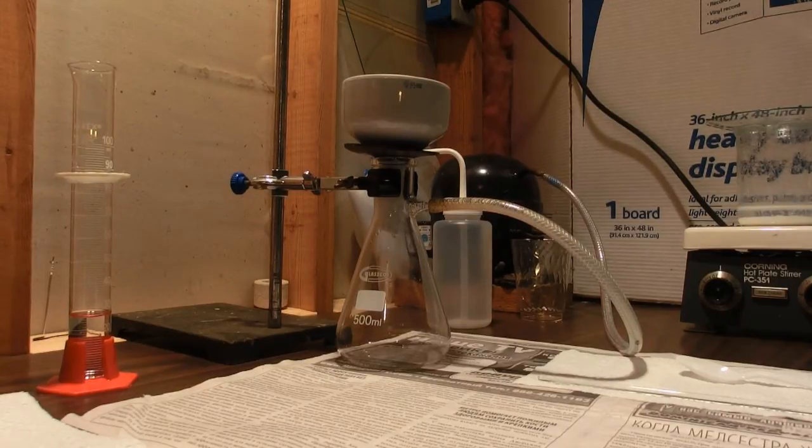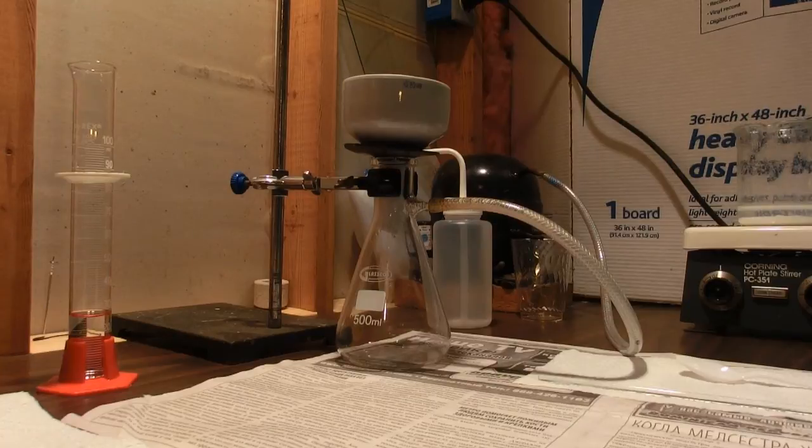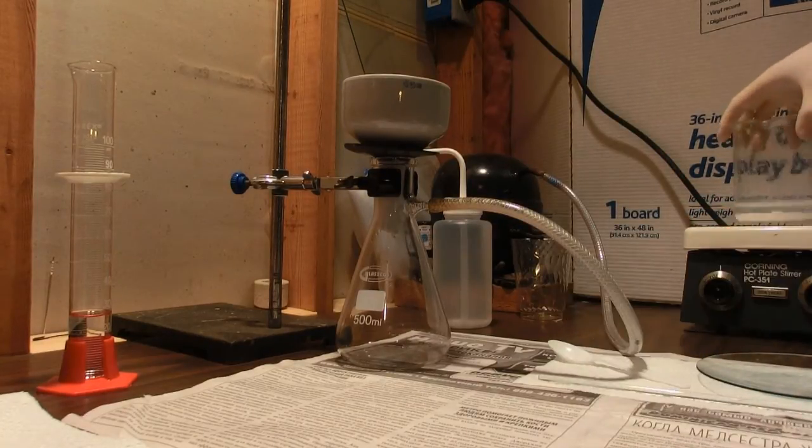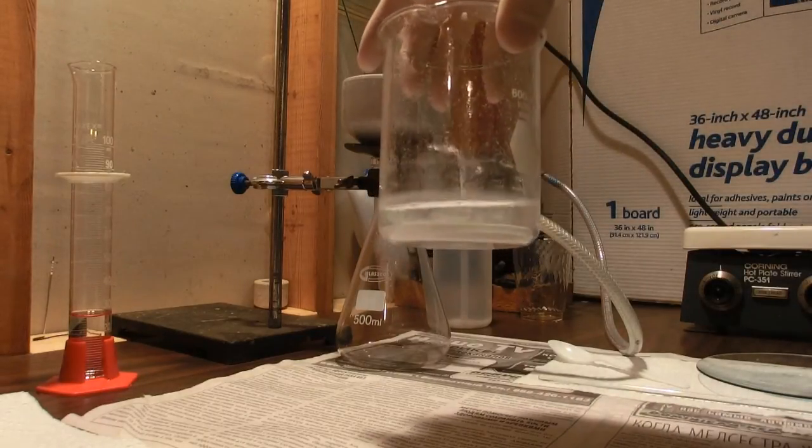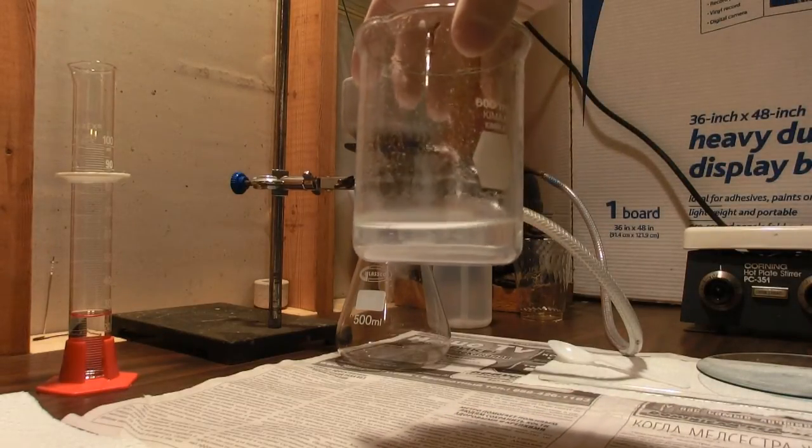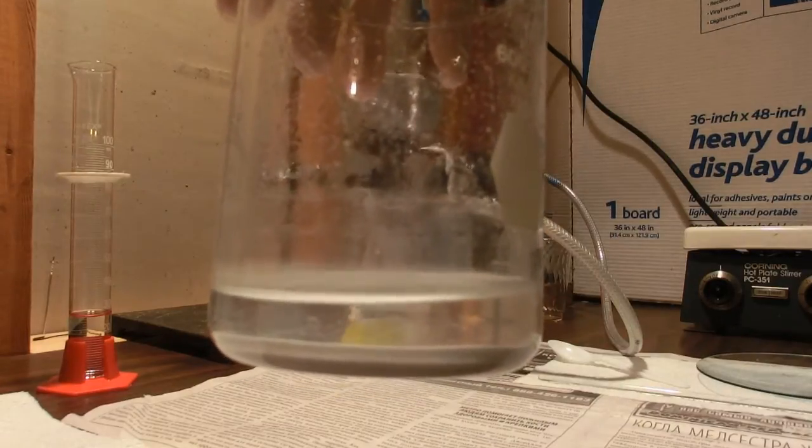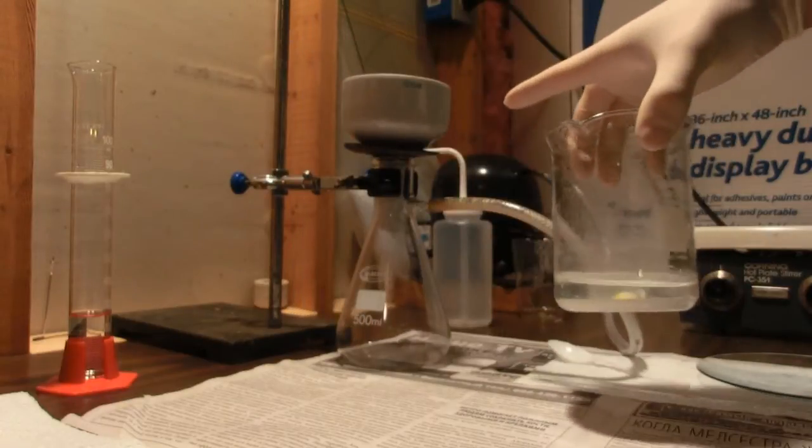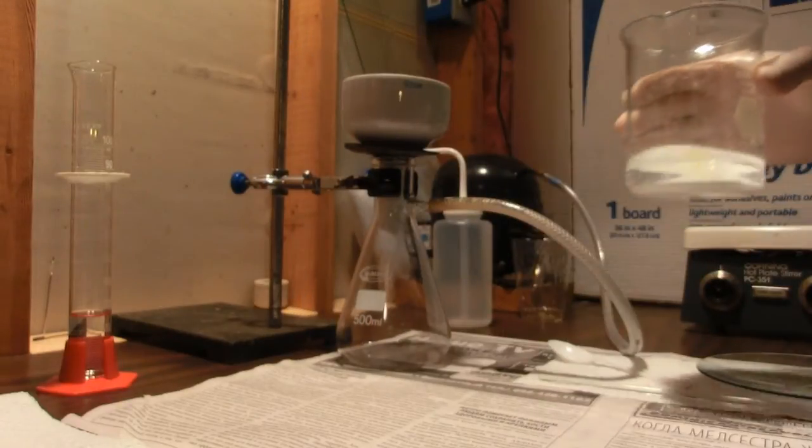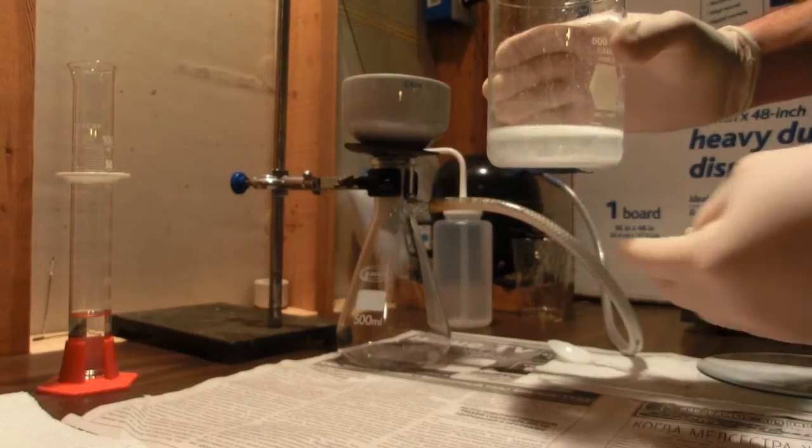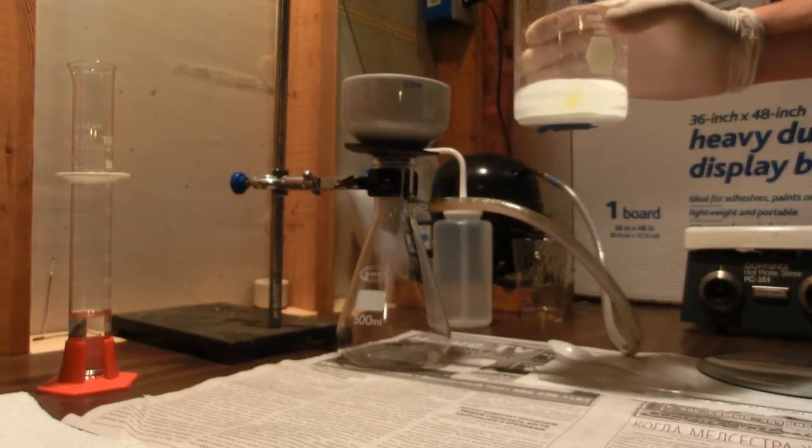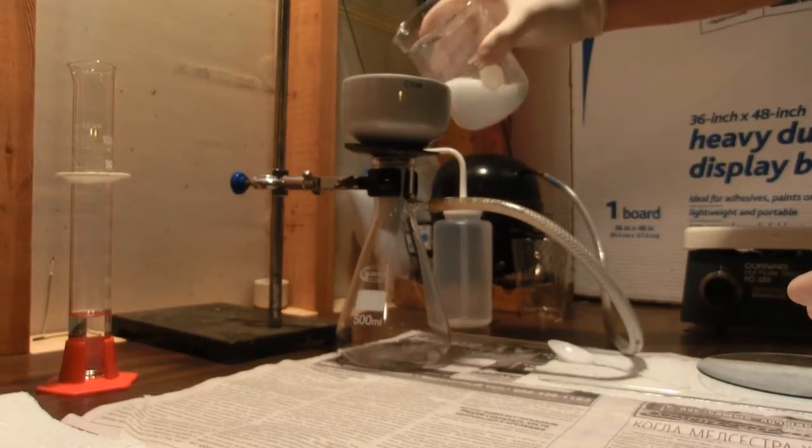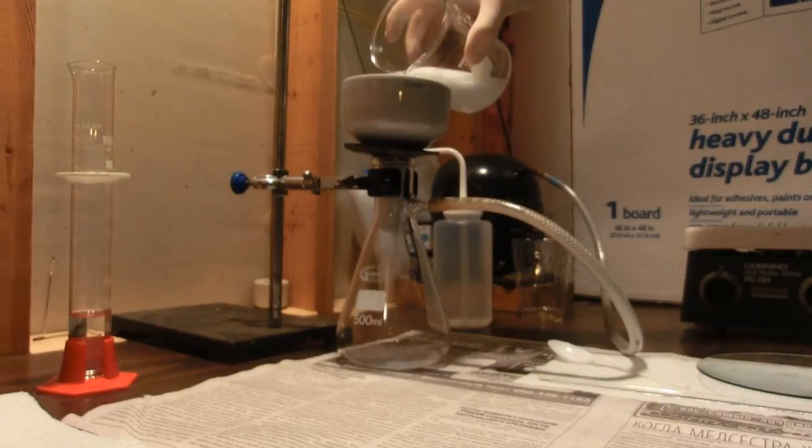Okay, after heating and stirring for quite some time, I think most of the sodium bicarbonate has reacted. And this is what we have: a solution with a precipitate of white lead at the bottom. So now we're going to vacuum filter it using this setup and then put a magnet to the bottom just to make sure our stir bar stays in place. Get a nice swirl and pour in the center of the filter.